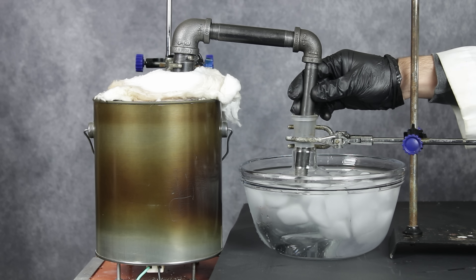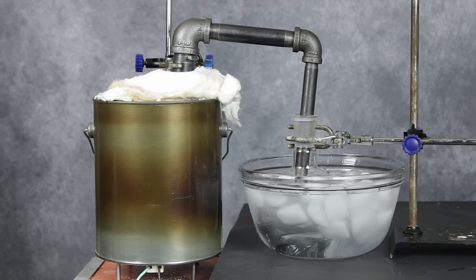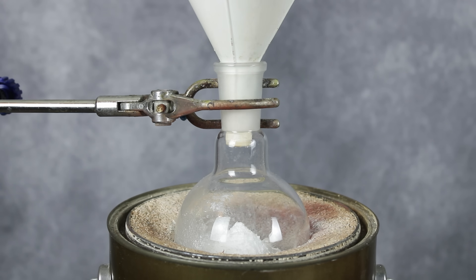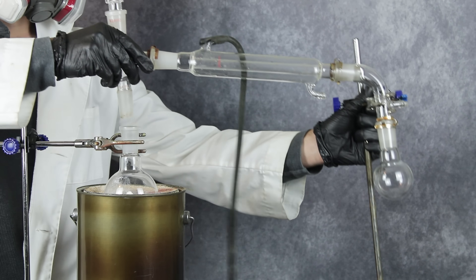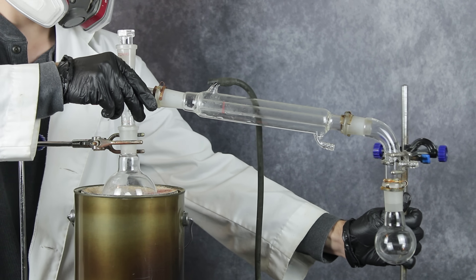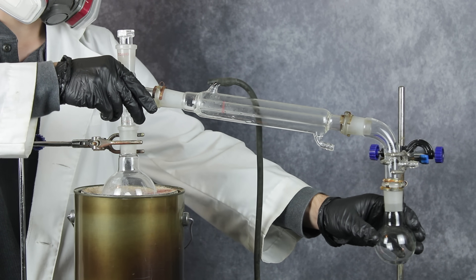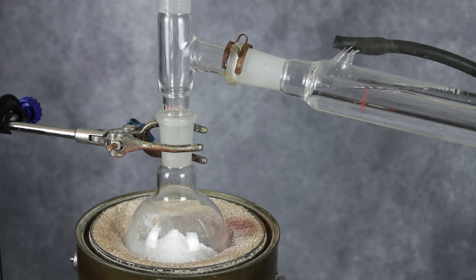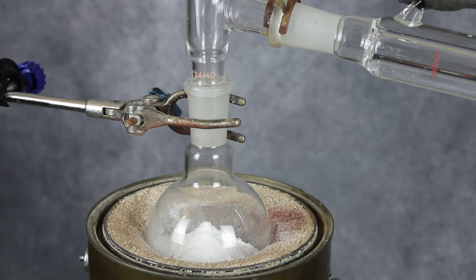But how could I improve upon my first test and actually succeed in collecting the phosphoryl chloride? Well, glassware. I just had to ditch the whole steel retort idea and go back to using good old fashioned glassware. I found an old flask that I didn't mind replacing, filled it with my pentoxide-salt mixture, and then threw together a quick distillation setup with an actual condenser. There is a chance that the reaction flask could be damaged by the high temperatures and hot phosphorus pentoxide, which is why I picked a flask that was already etched and somewhat unsightly. This was a 250 mL flask, and it happened to fit nicely within my kiln.